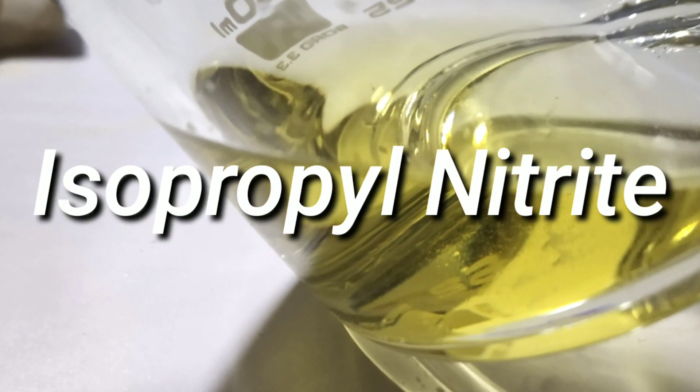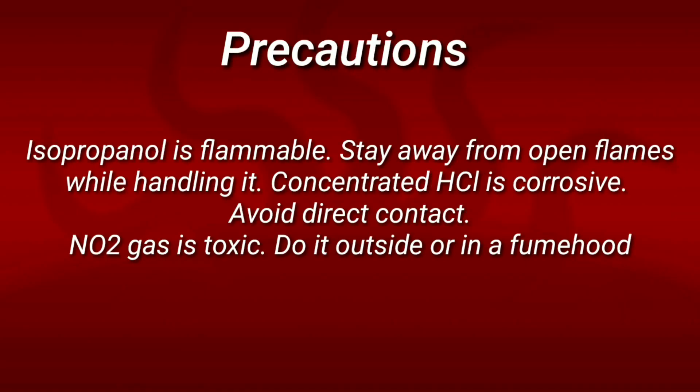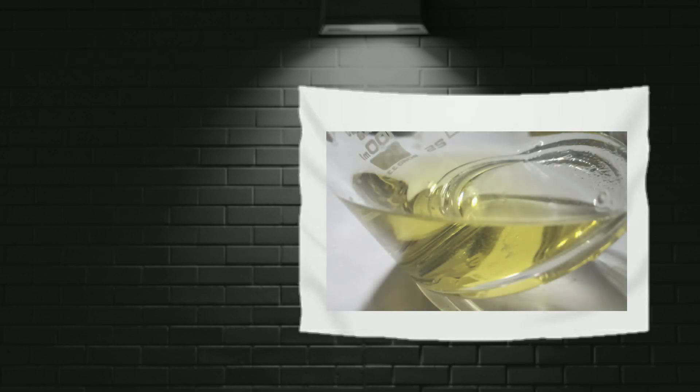Hello friends, in this video we will synthesize isopropyl nitrite. Isopropyl nitrite is an alkyl nitrite made from isopropyl alcohol. It is a pale yellow colored clear fluid.